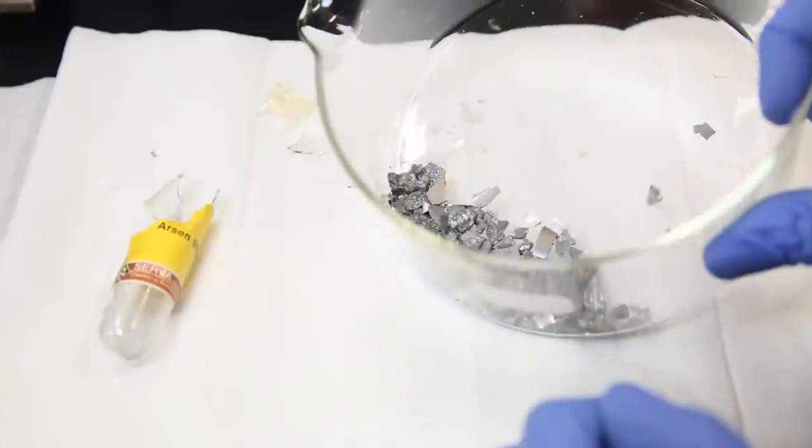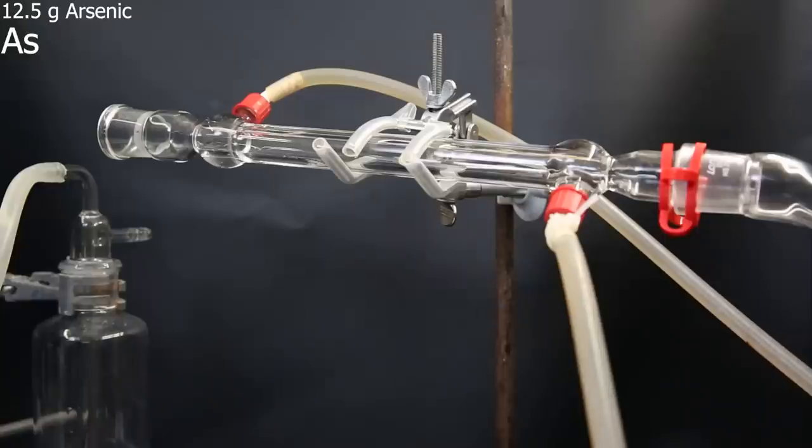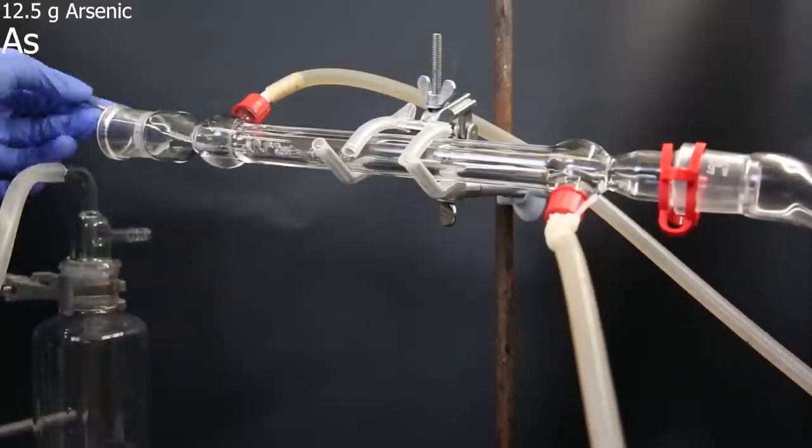Now that I have the shiny pieces of arsenic, I can set them up for chlorination. So with the spatula, I carefully add in 12.5 grams of the arsenic pieces into the condenser, and shove them inside.